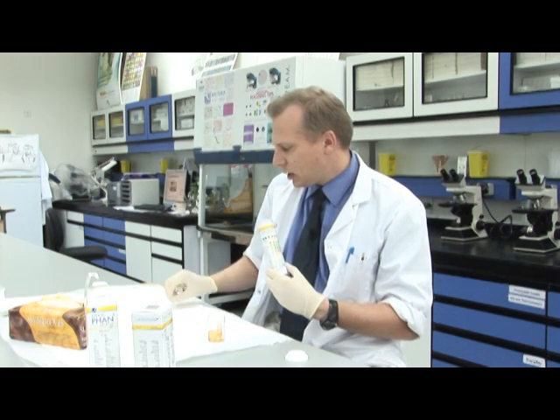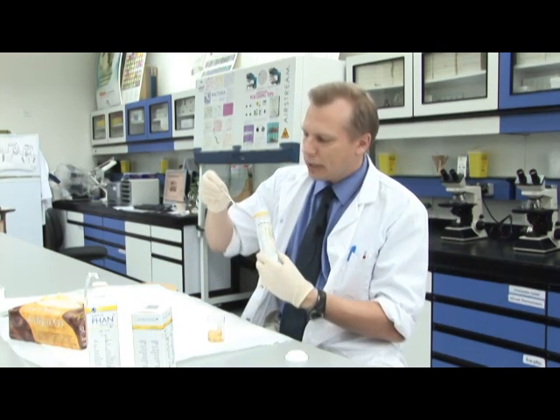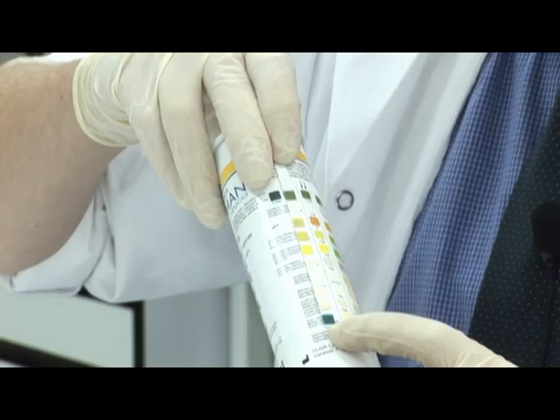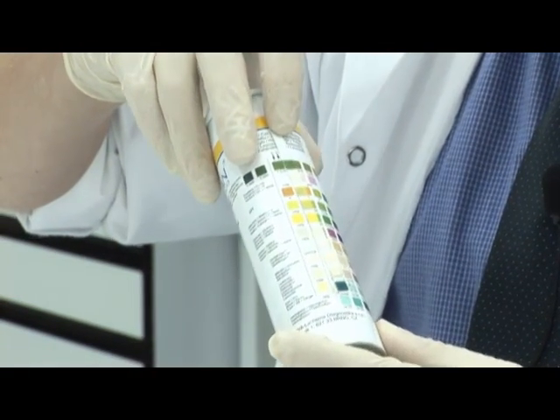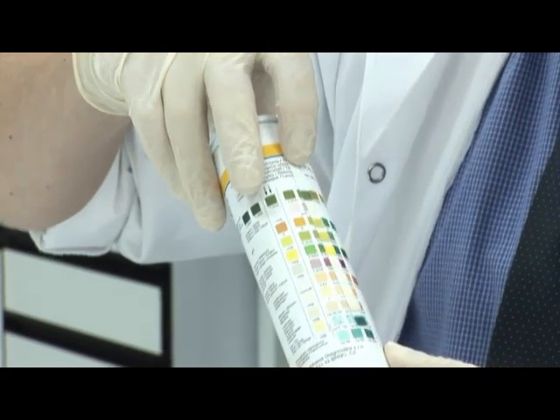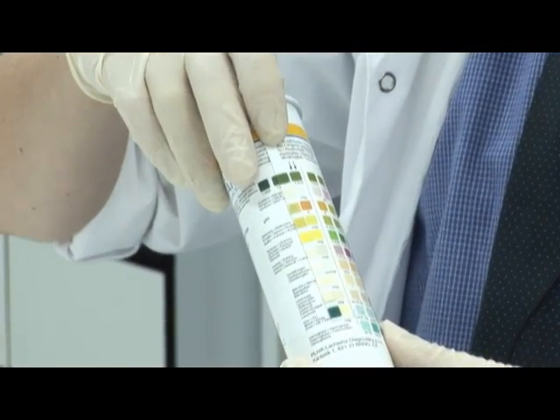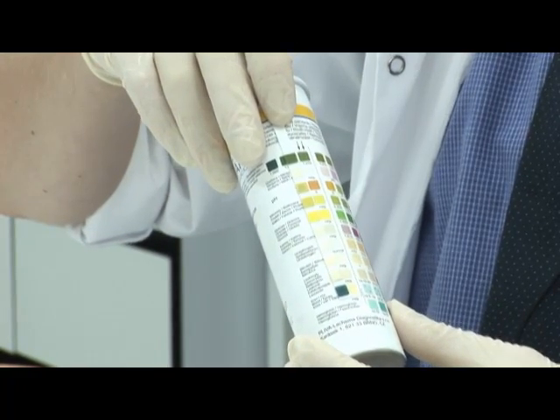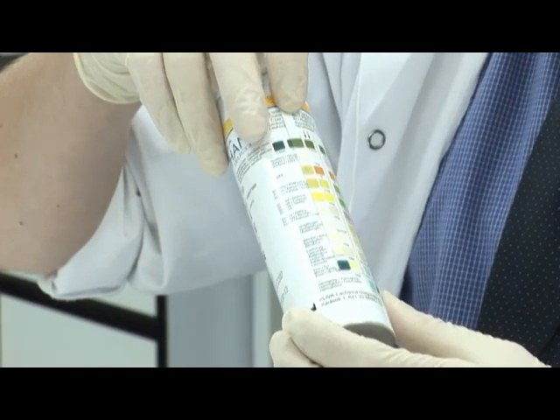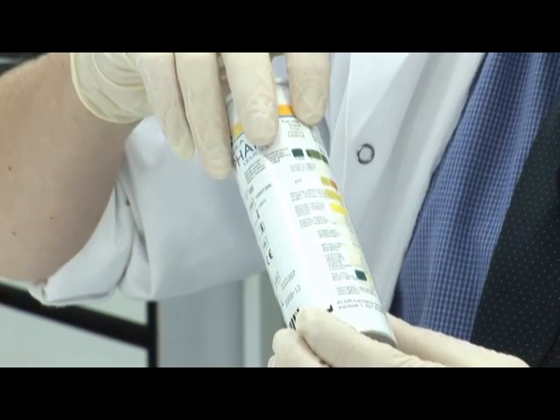Okay, I think that's probably had enough time now. We're getting a strong colour reaction there on the end. So if we hold it up to the vial like this and look along it, making sure I've aligned the squares properly — I'll start at the bottom and we've got quite a strong blue colour down there. This one is the test for blood. Normally if it's negative I should get a yellow colour, and instead I'm getting quite a strong dark blue. So that means there is a significant amount of blood in this sample. That's quite a strong reaction.